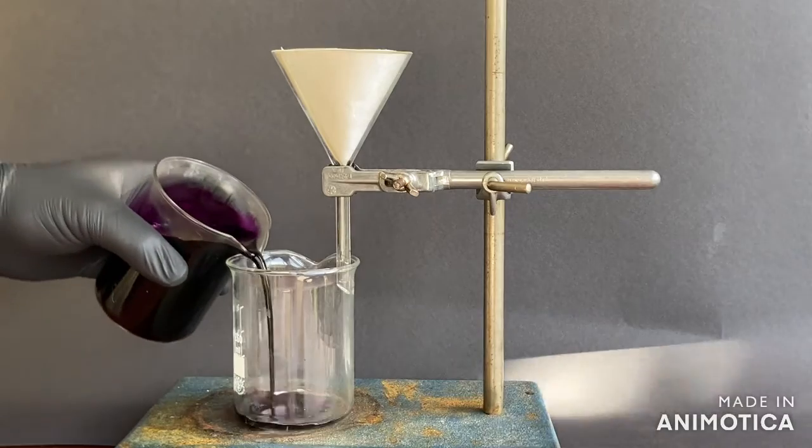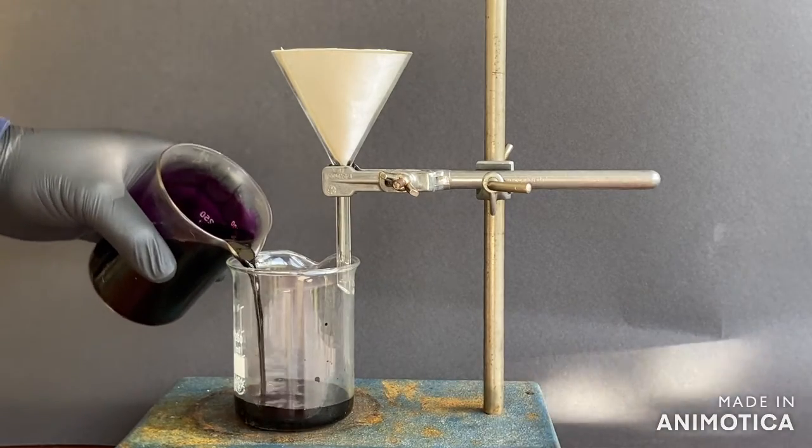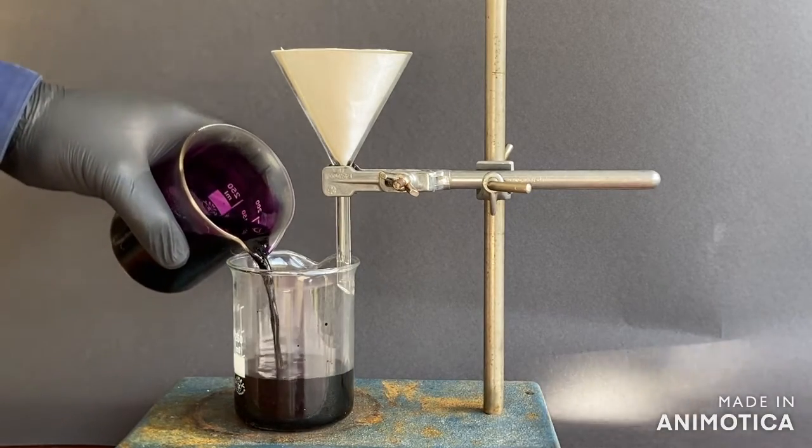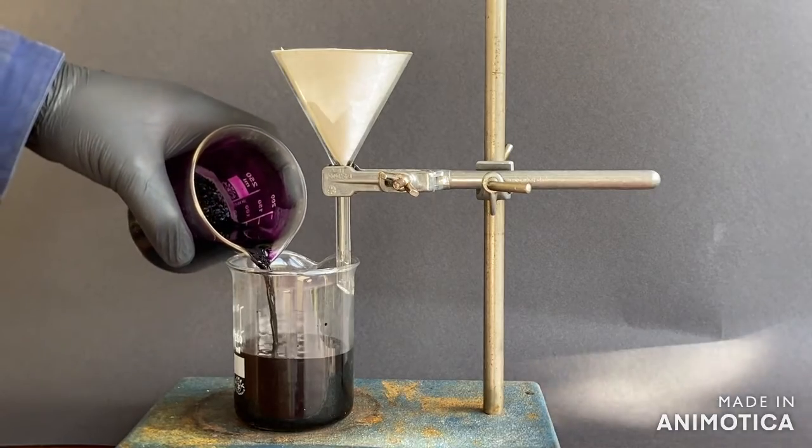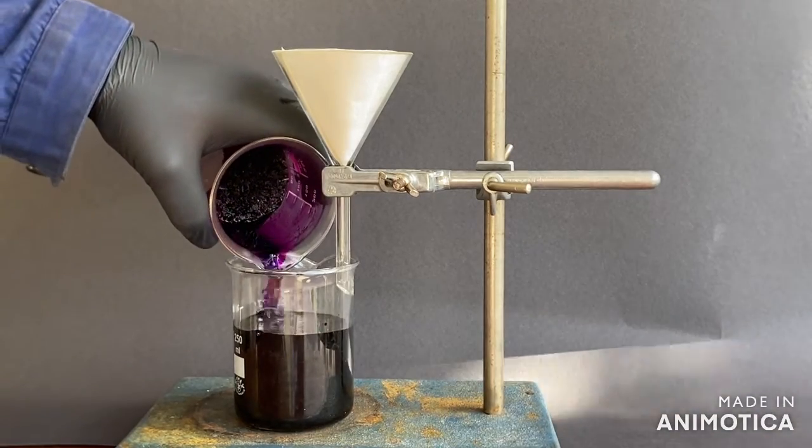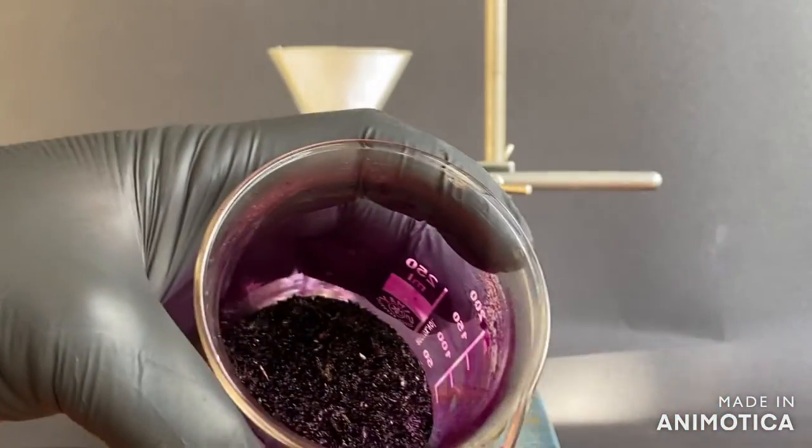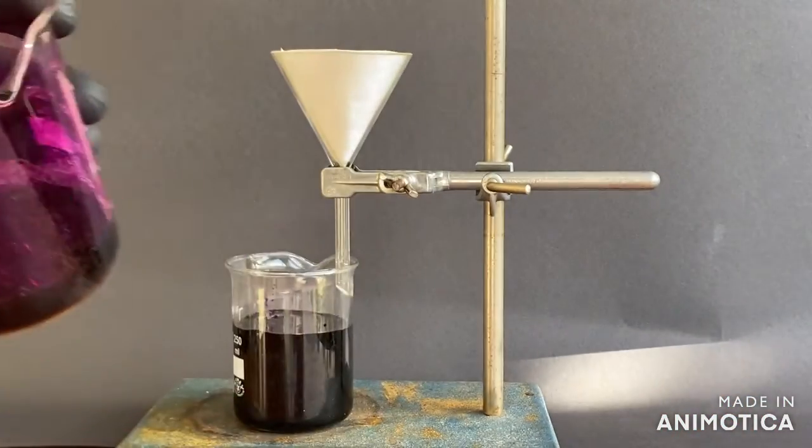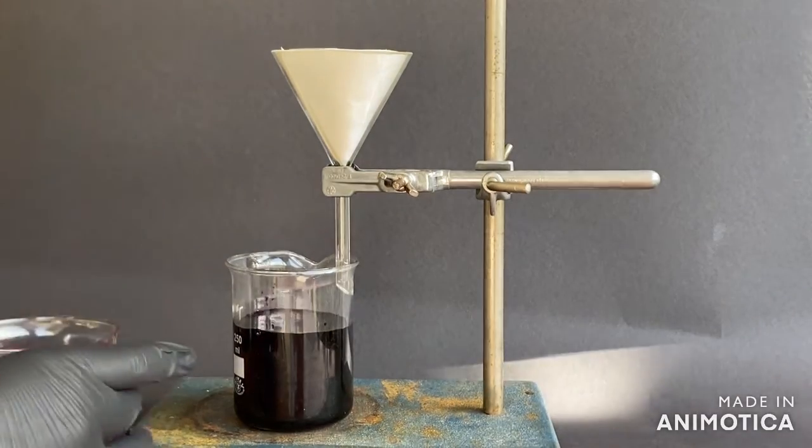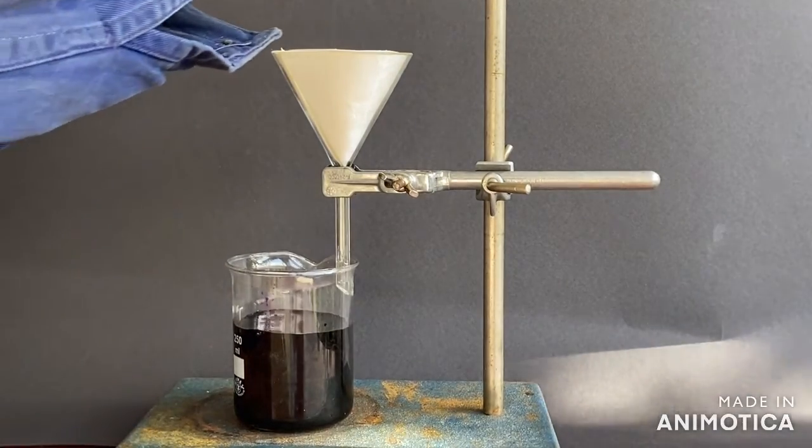First I will decant most of the liquid. As you can see there is a bunch of ammonium permanganate crystals on the bottom of the beaker. Now we filter the crystals.